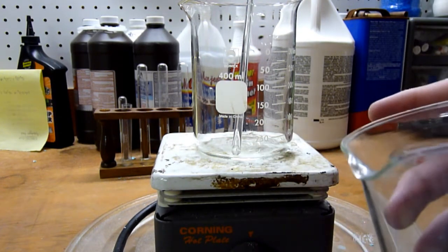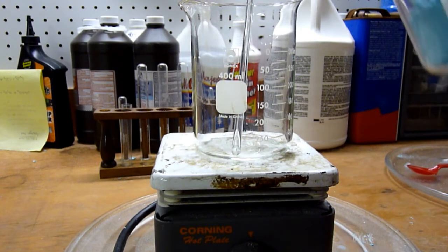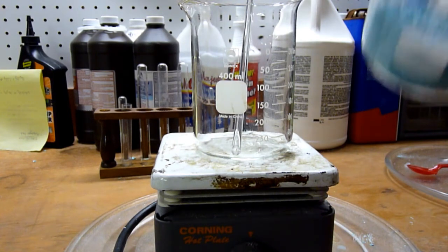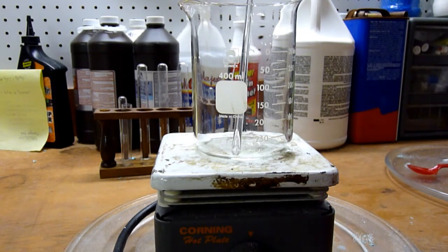This right here is a very hot piece of glass. It's on my hot plate, it's on high. It's been heating for a little while. And I'll pour this in and we can just stir the powder and we'll soon be able to see some color changes. This will probably go to dark green and then finally to the copper oxide which will be black. So here we go.